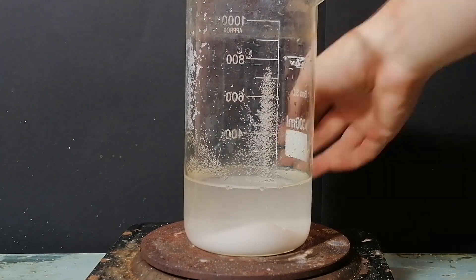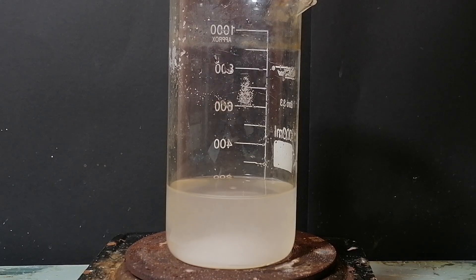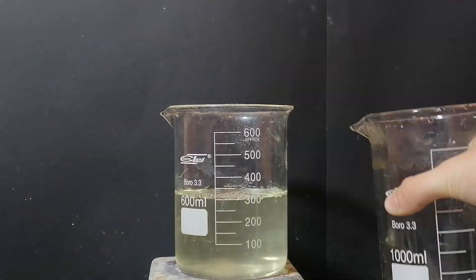So I filtered the solution once most of the stuff dissolved again. Anyway, this is a bunch of potassium chloride and hippity hoppity you're now in water. After mixing everything I've waited for as much of it to dissolve and then I've added it into the now salt and chlorate mixture.